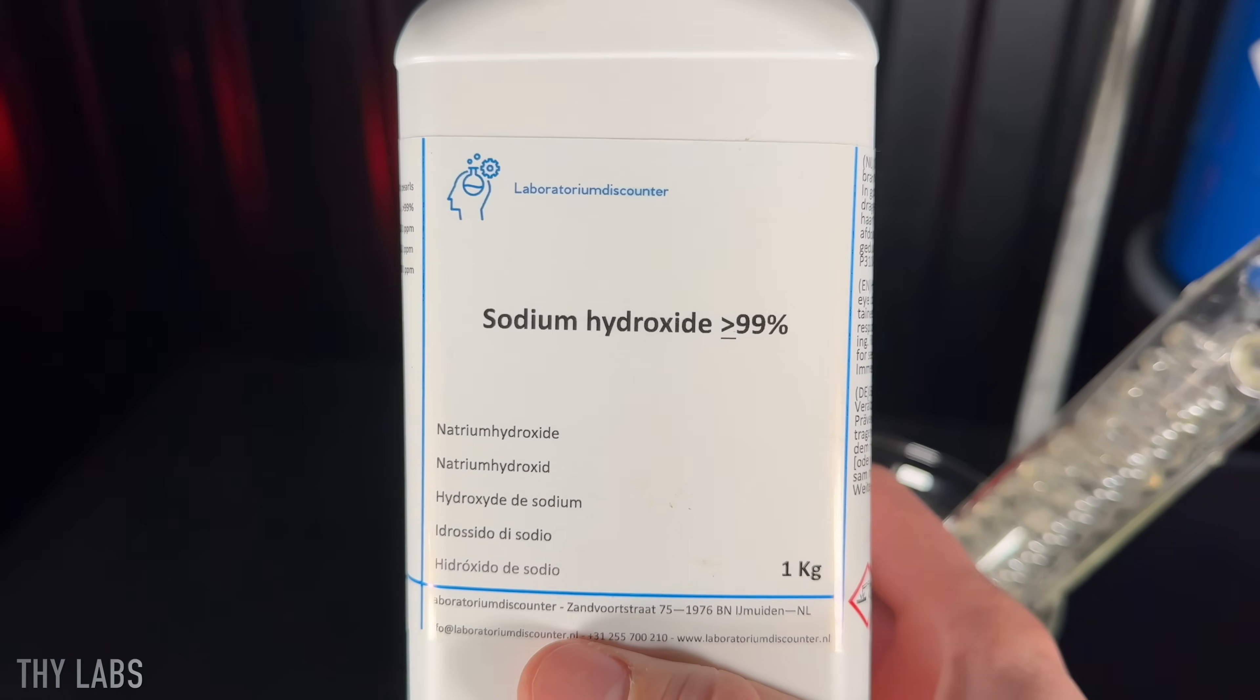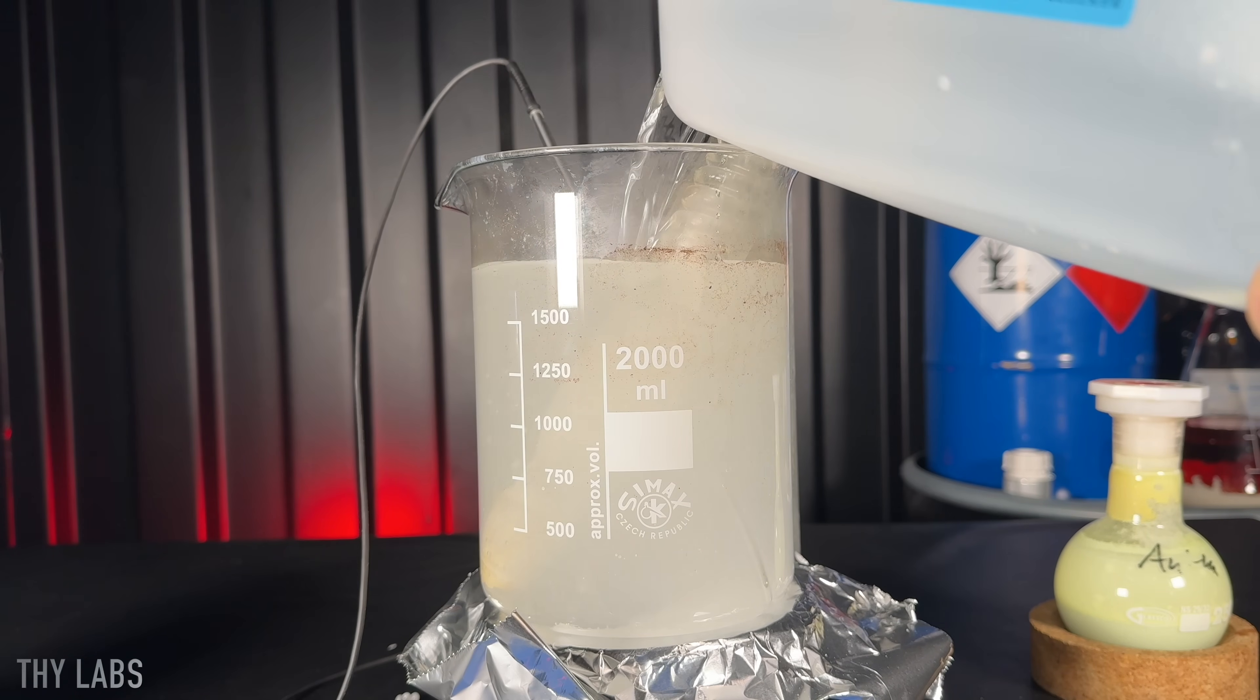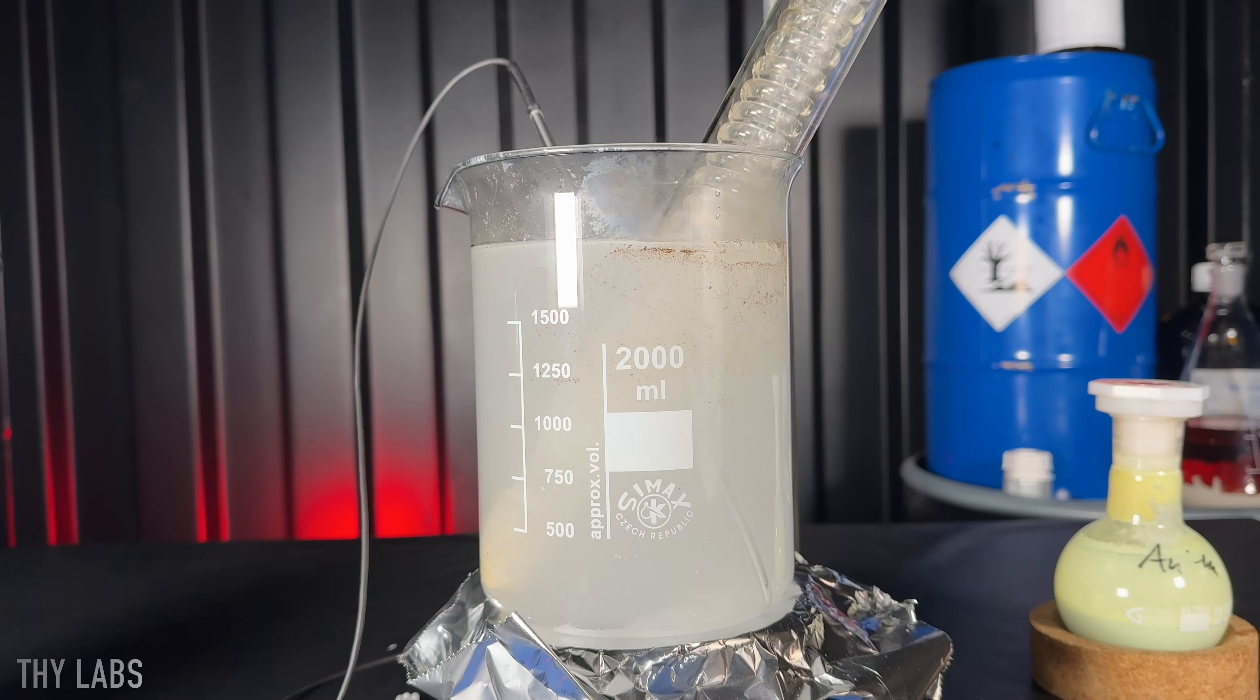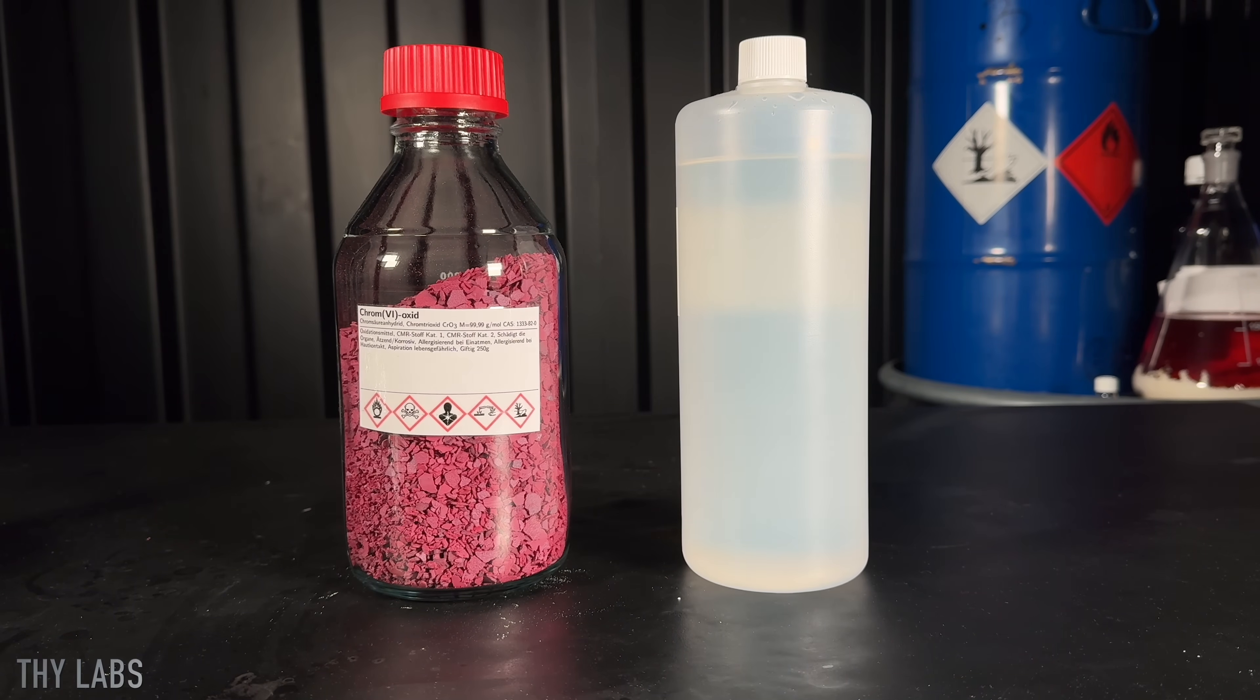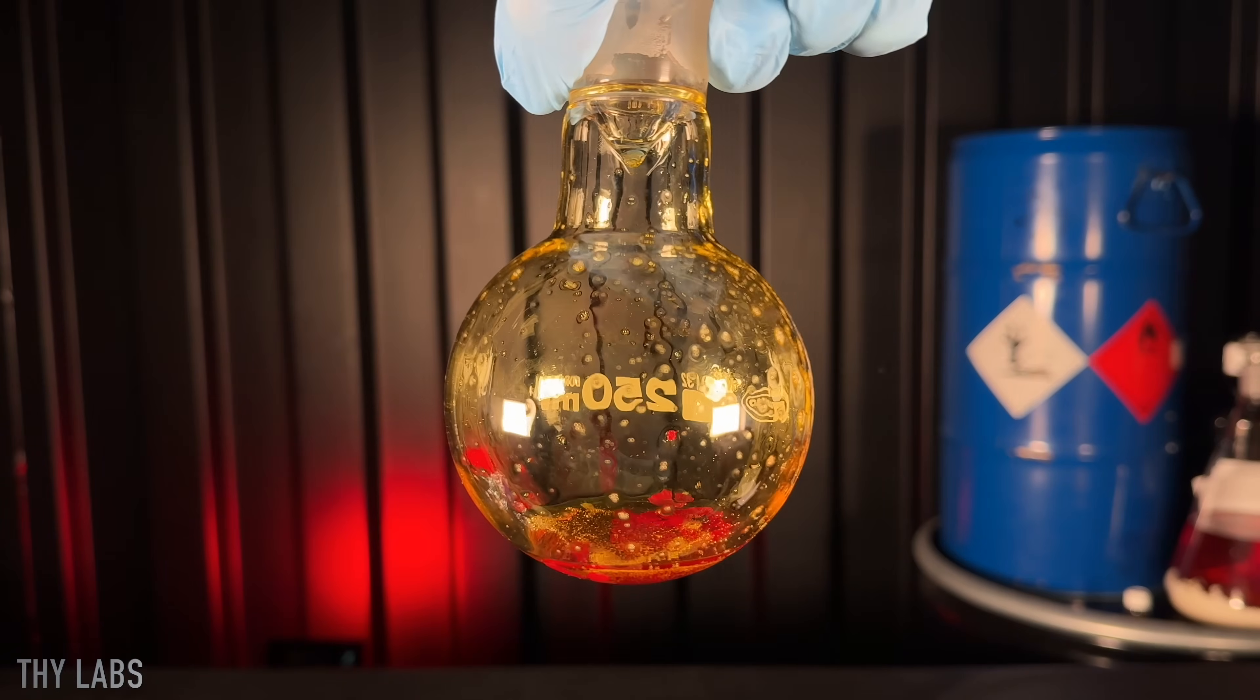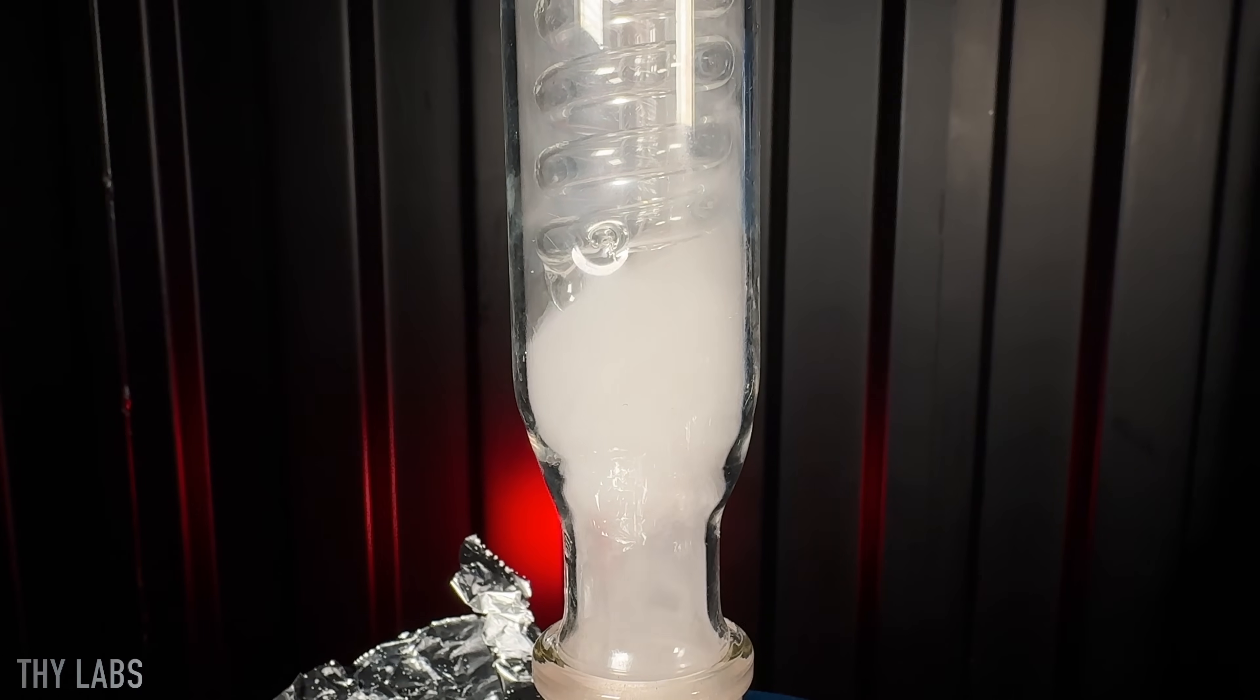There was some insoluble residue in the condenser and in the flask. I tried to get rid of it with many methods. I tried to clean it using acetone, using boiling hot sodium hydroxide solution, using a mixture of chromium trioxide and sulfuric acid. I even tried boiling hot piranha solution and refluxing concentrated sulfuric acid.